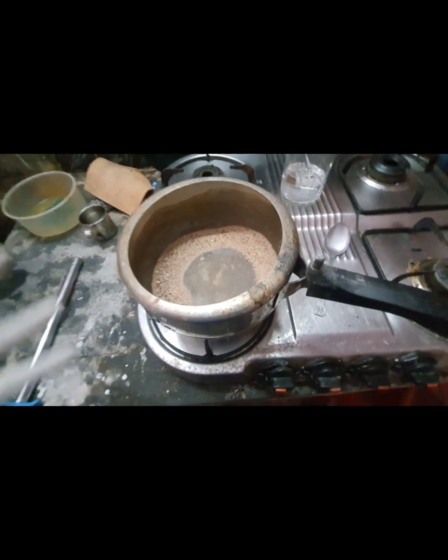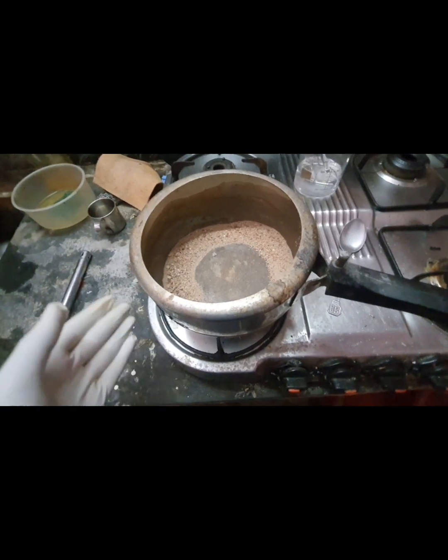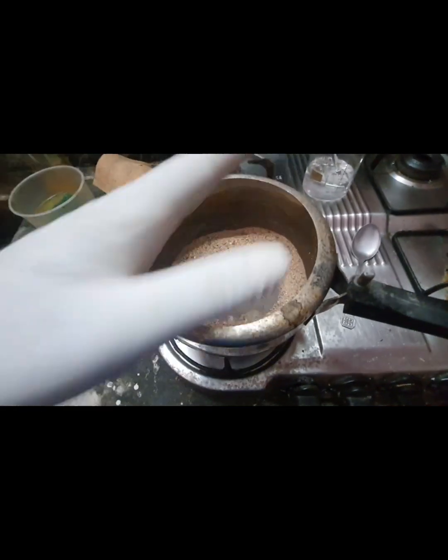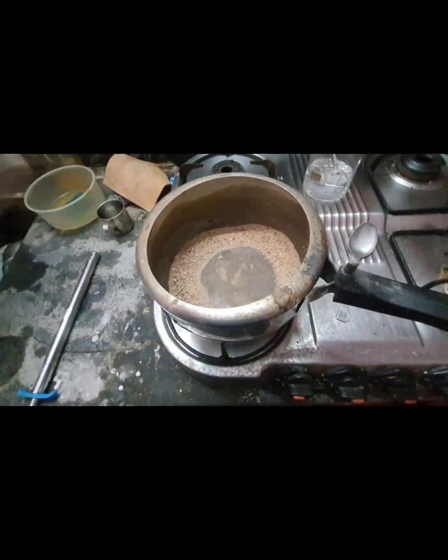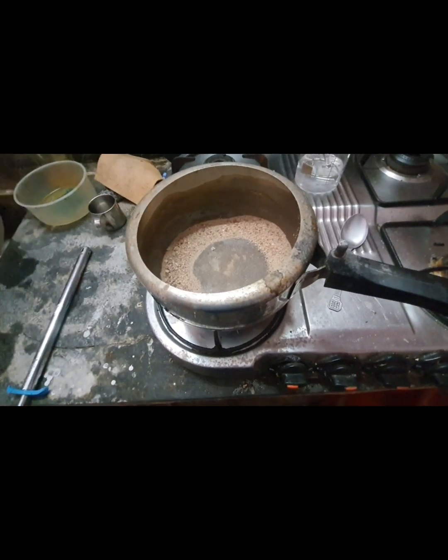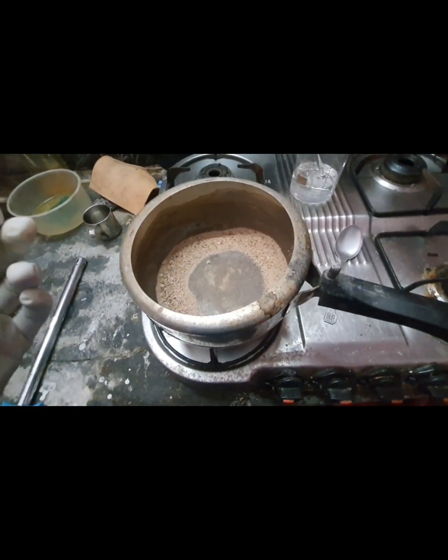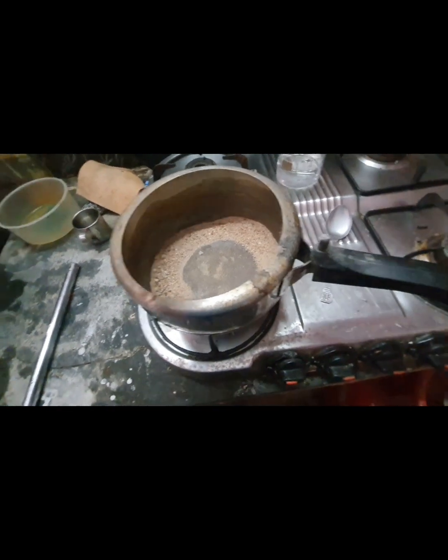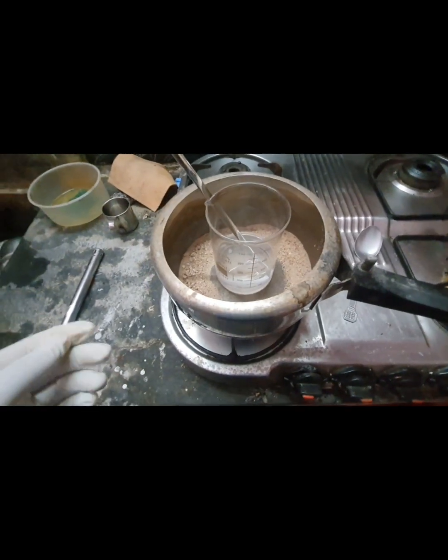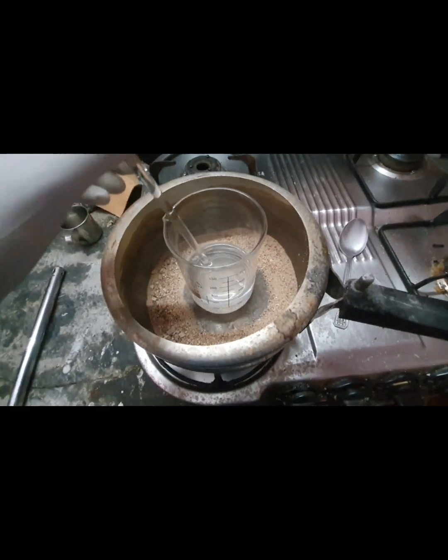To be sad, we don't have access to a hot plate stirrer or a heating mantle, so we will be using a gas stove cooktop. And this one right here is a pressure cooker which I filled with some sand to balance out the beaker. I do not recommend you trying this at home because it's really risky, but I've got used to it. I have done this many times, so I have confidence that I can do this. So we will be transferring this beaker inside this cooker so that we can hopefully see the water boiling out and the crystallization taking place.